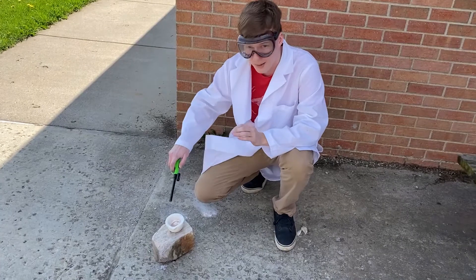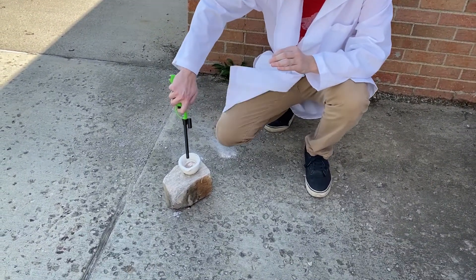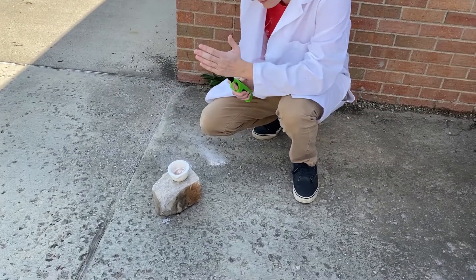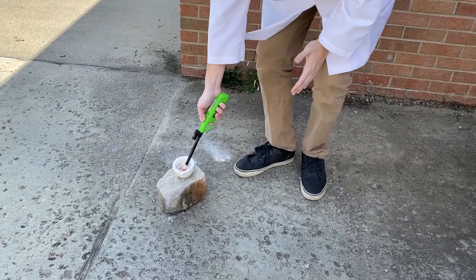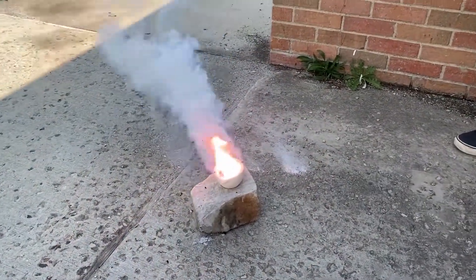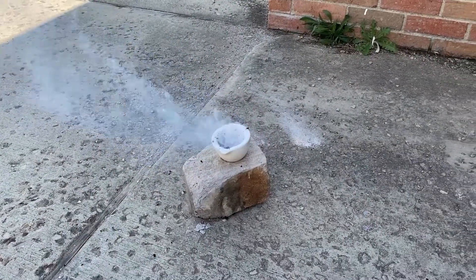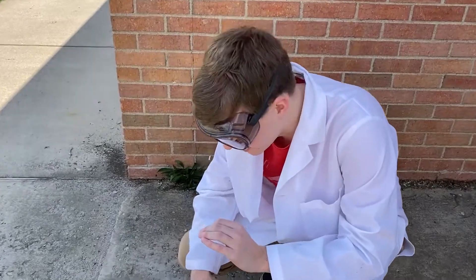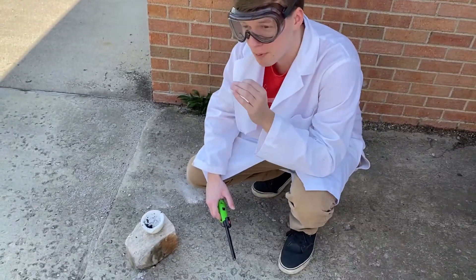Pay attention to what color flame you see here and we'll just light this up. Now, if you paid close careful attention, you will notice that it actually was a purple flame again.